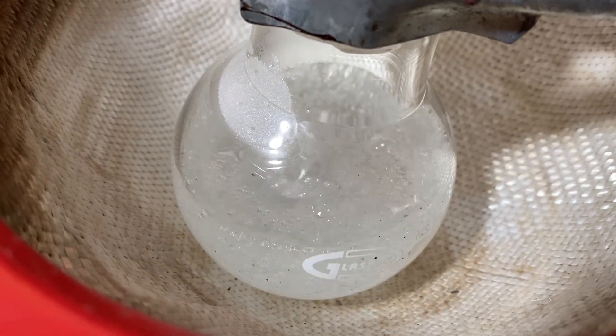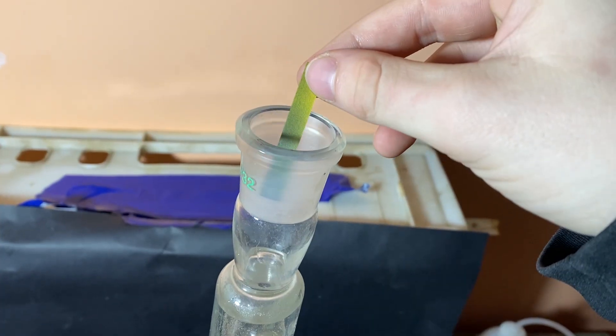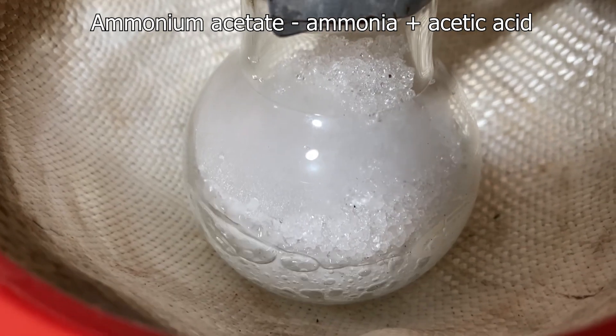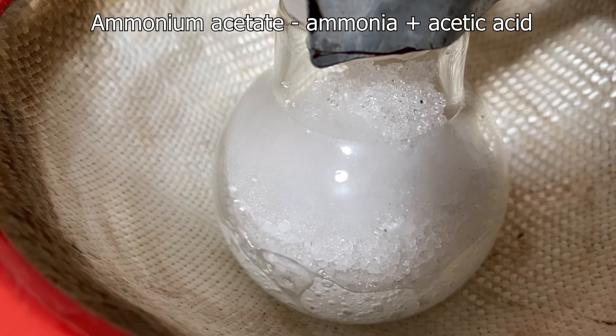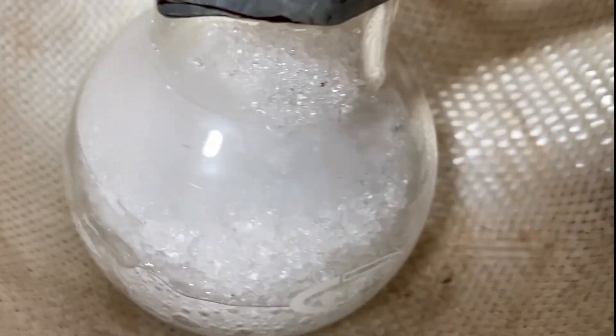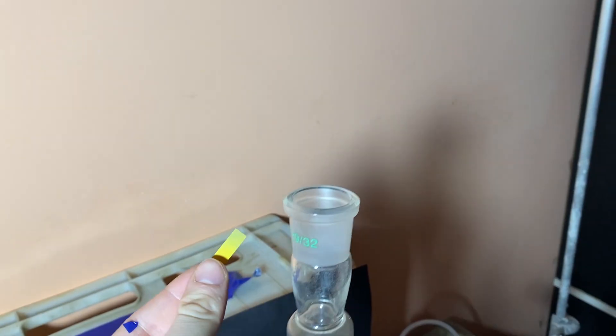Once everything liquefies, I get hit by an extremely familiar yet irritating smell, which means some of the ammonium acetate is breaking down into its components. The biggest problem with this is that our yield is being very harshly lowered.